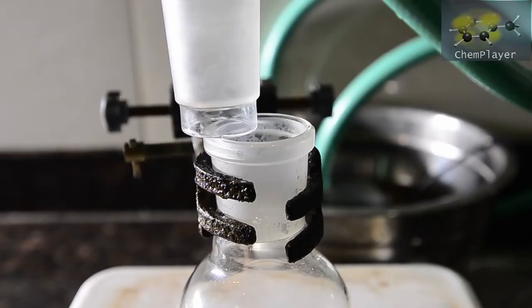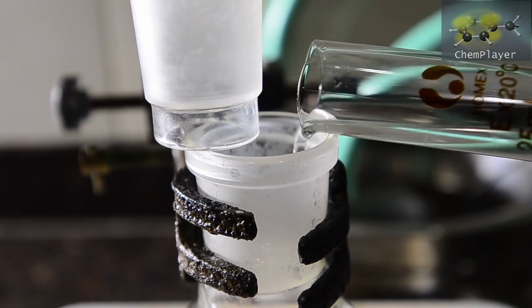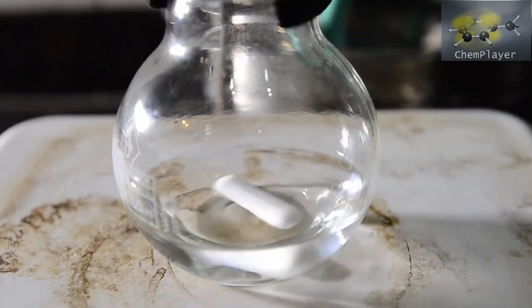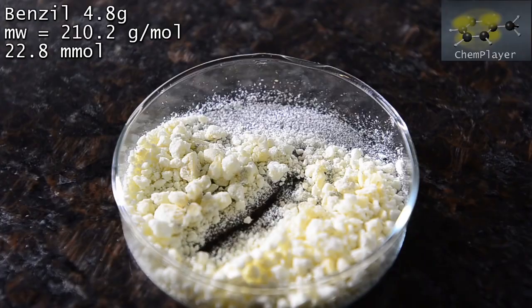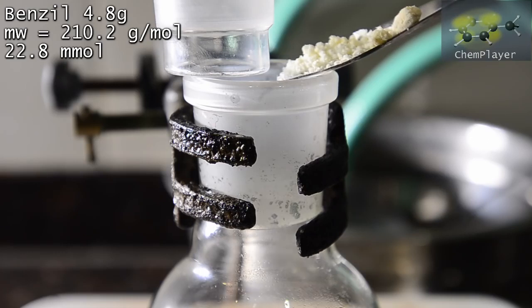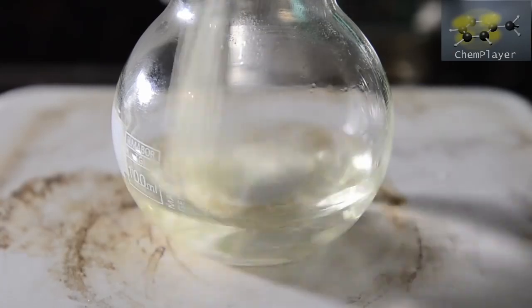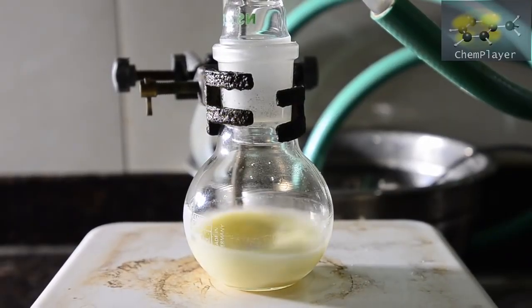We've removed the condenser temporarily. Let's get the solvent in. Okay, here we go. Now for our starting material. 4.8 grams of benzil. We now add this to the flask. Here we are, all loaded and with the condenser reattached.